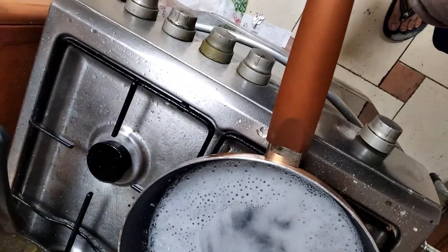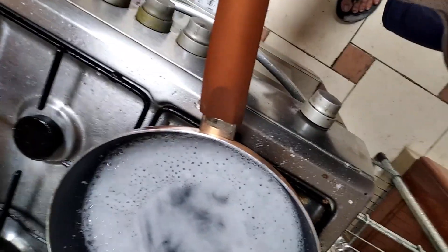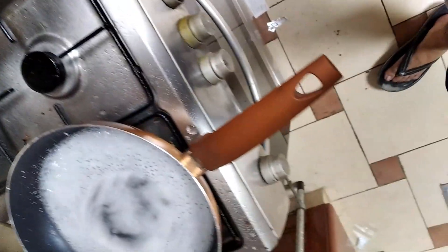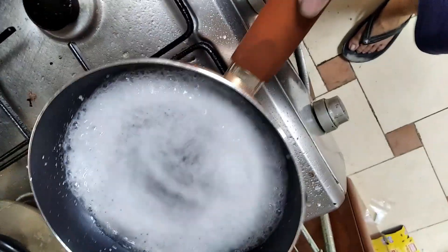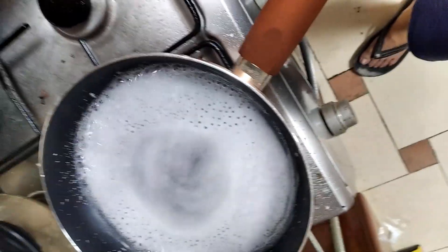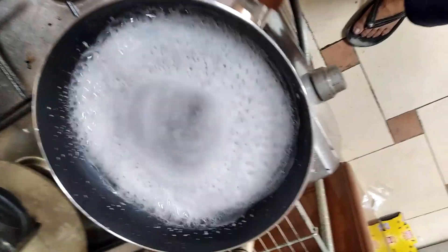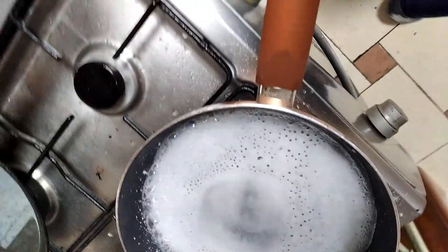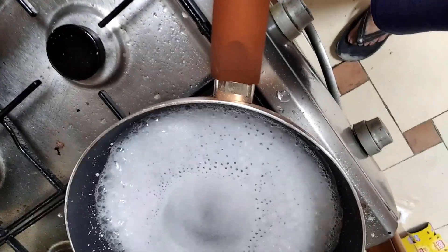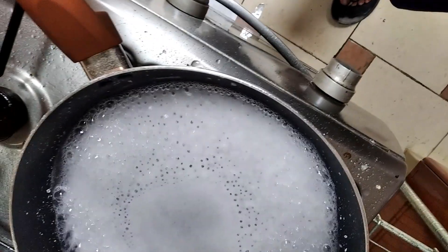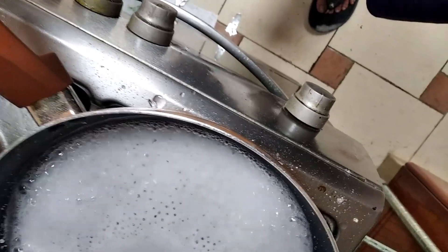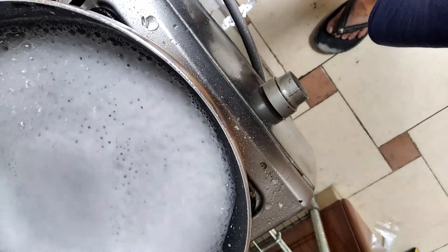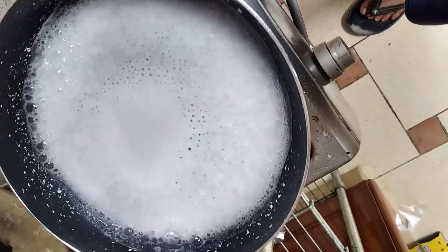So after day two, the calcium chloride in the cell has got consumed. The pH has gone up to 7.4 and that's no good. So what I'm doing right now is I'm actually extracting all the calcium chloride from a batch of that cheap salt. I'm gonna then concentrate this stuff. Upon heating, calcium chloride solubility is higher than that of table salt, so any remaining water in here will contain all the calcium chloride I need.